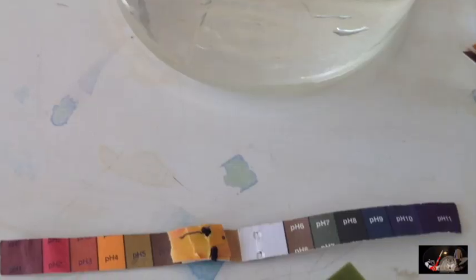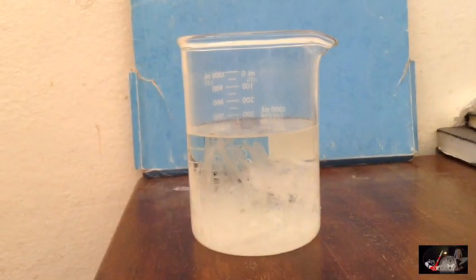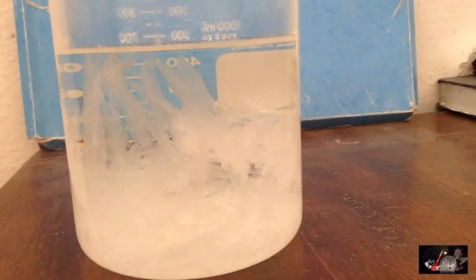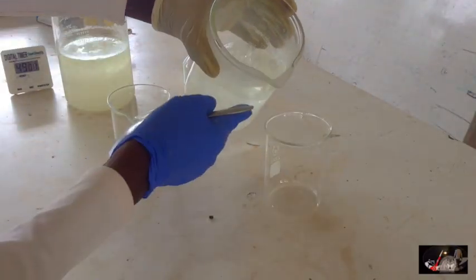Let's reheat the clear solution and allow it to cool down. Here you go, this is the expected result. You are now looking at the KNO3 crystals. Let's go and decant it, leaving the crystals behind.